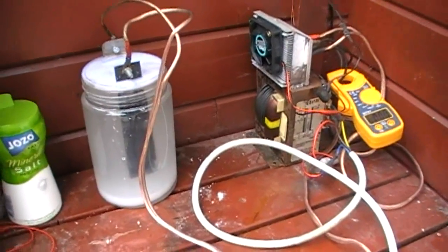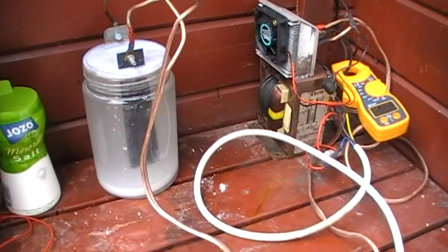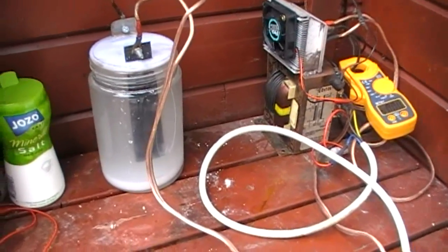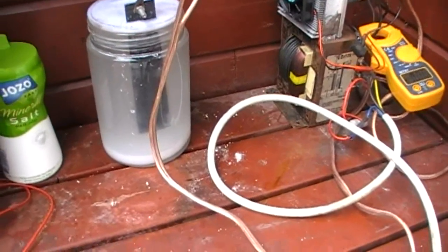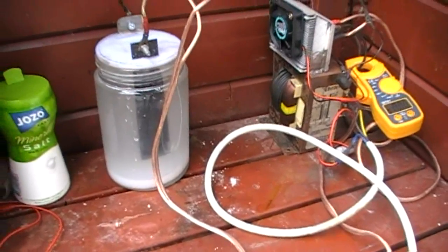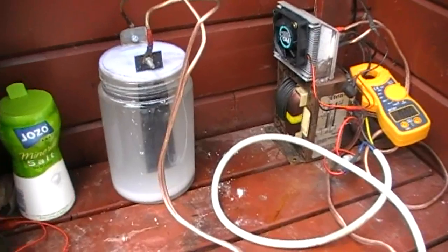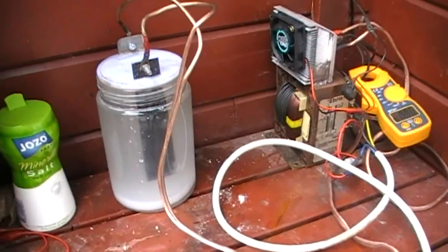This supply pours out around 20 amps but after some hours the cell is getting like 15 amps on average. So let's get back to the cell later.